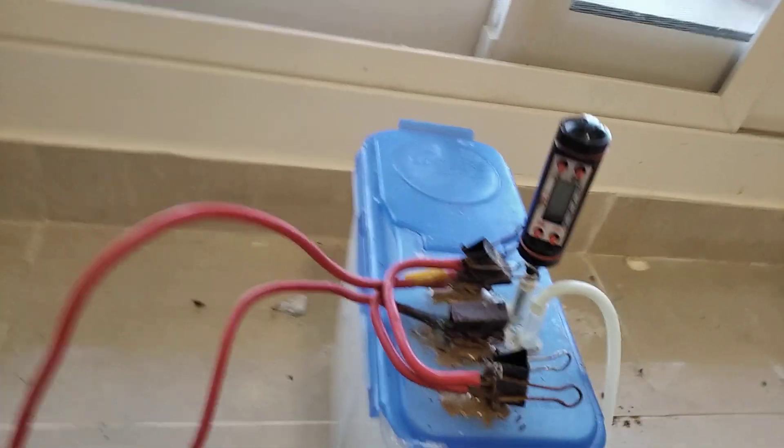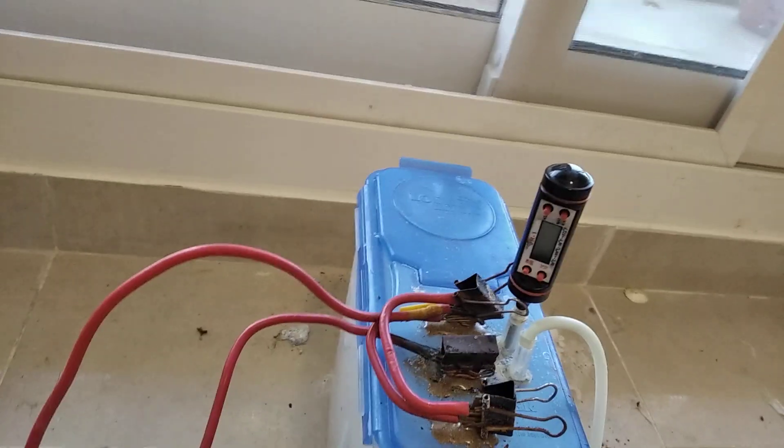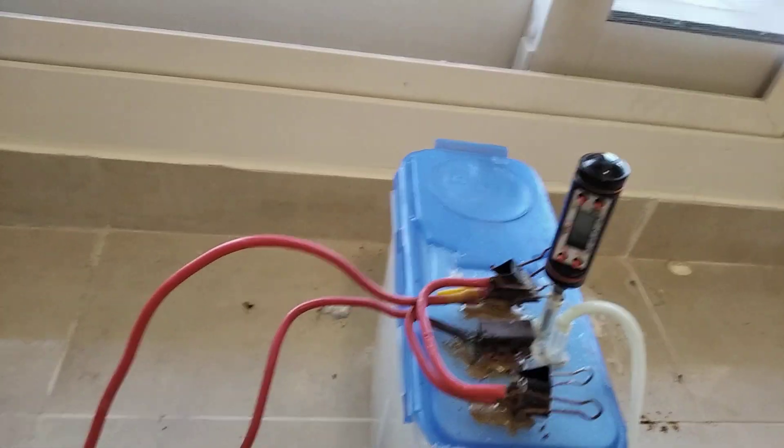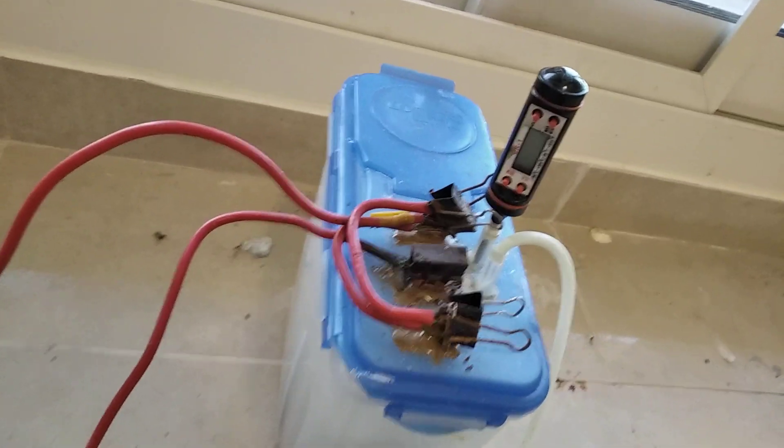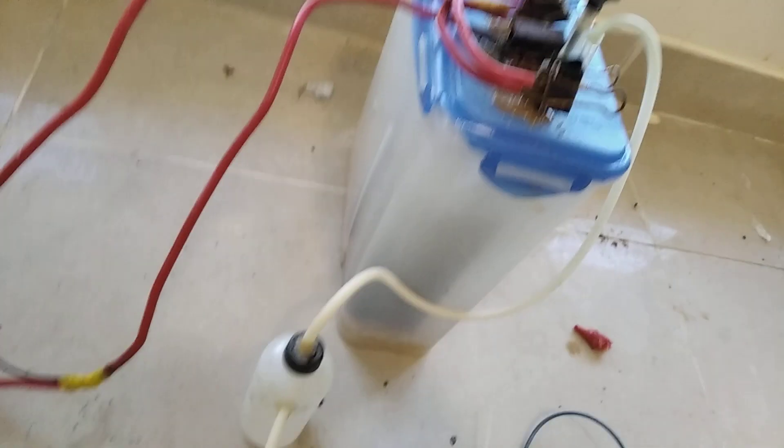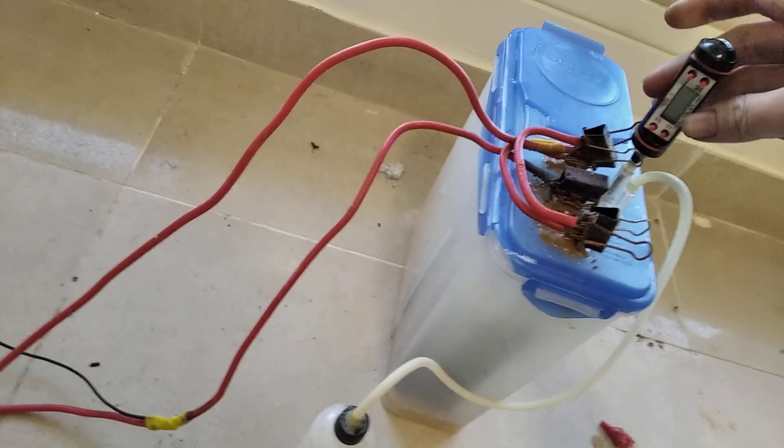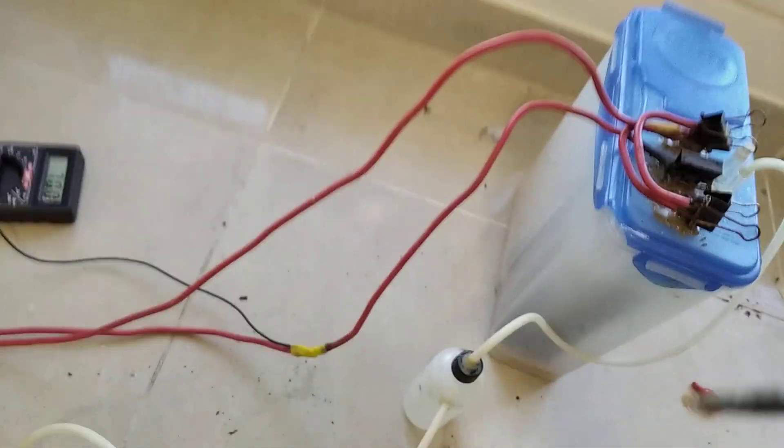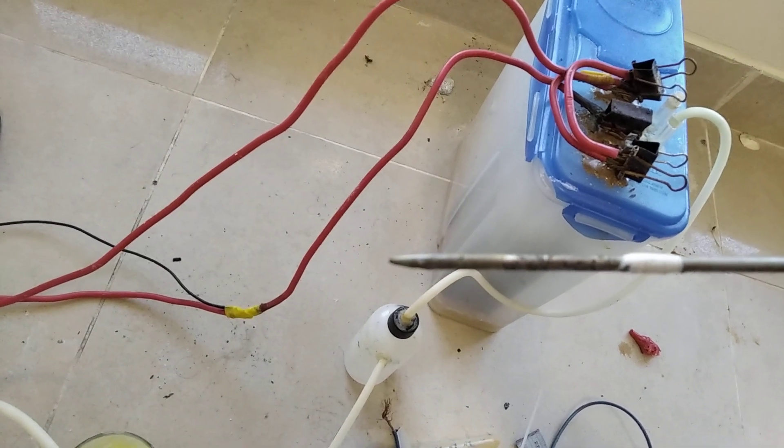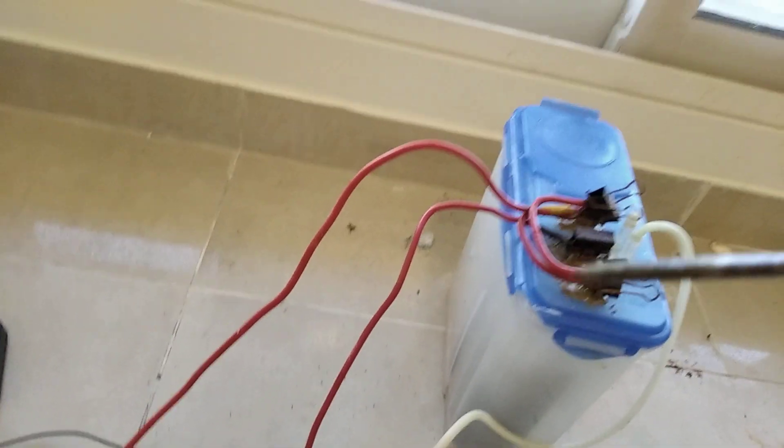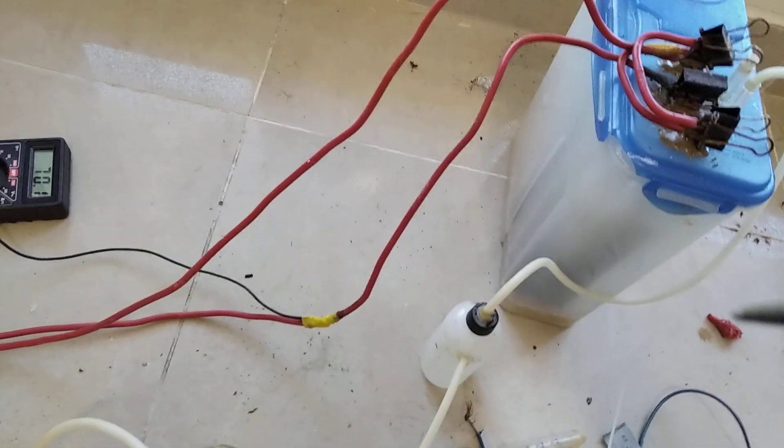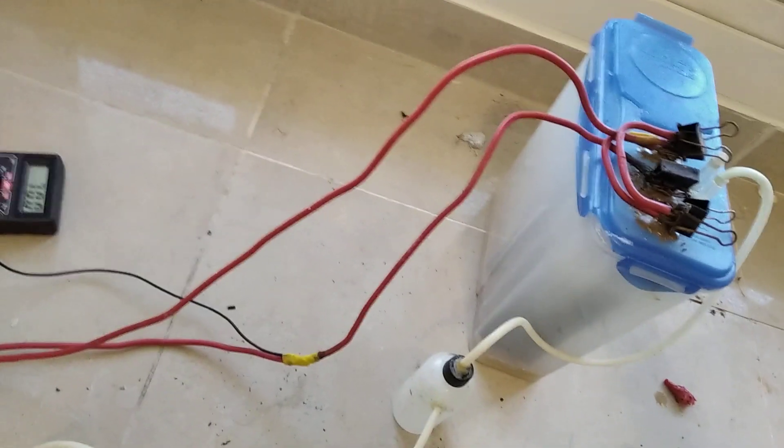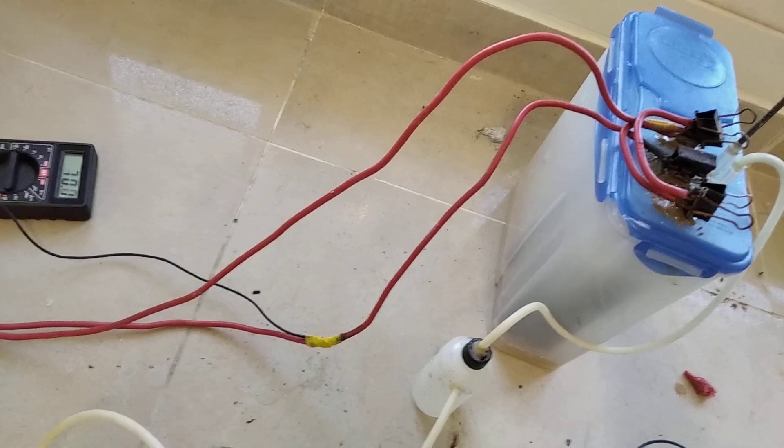This thermometer probe has been coated with engine enamel which allows it to be resistant to the cell. So even though it looks like there's gonna be metal in there, it's not. If I pull this out right now it looks kind of like shit but that was previous damage and the coating doesn't seem to be causing any more damage to this thing. And even if it does, I will just coat it again and plate it with Teflon.